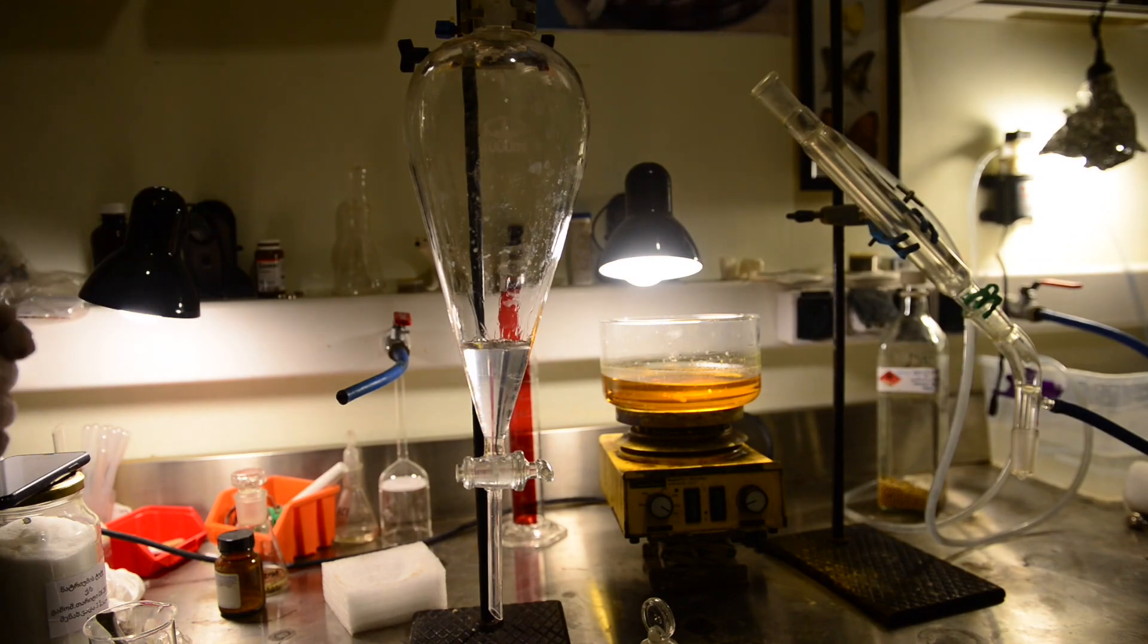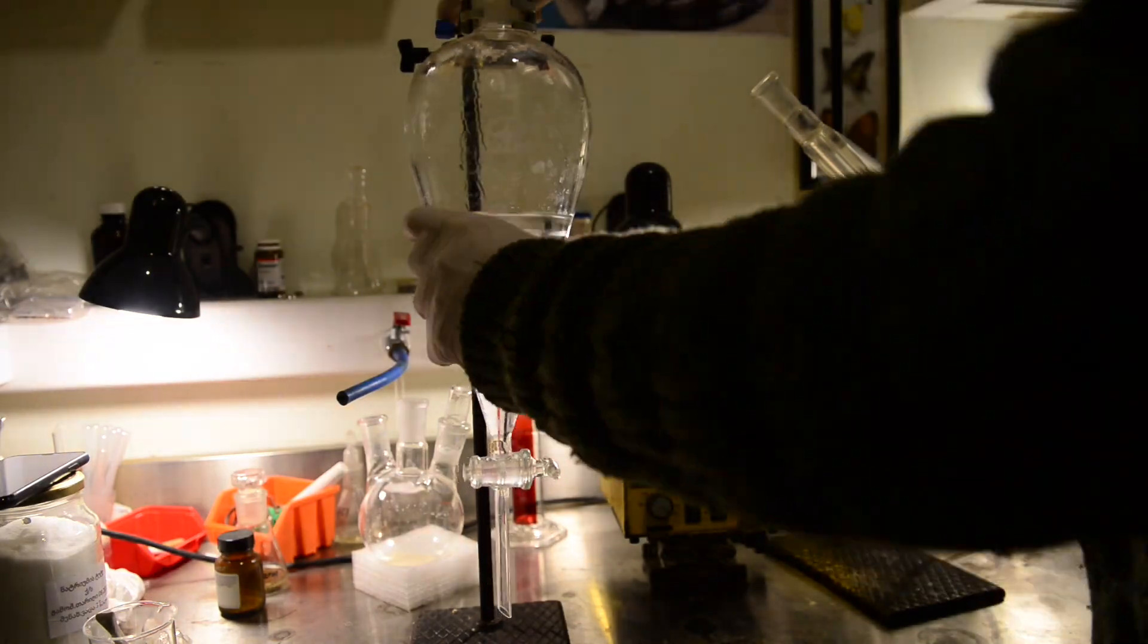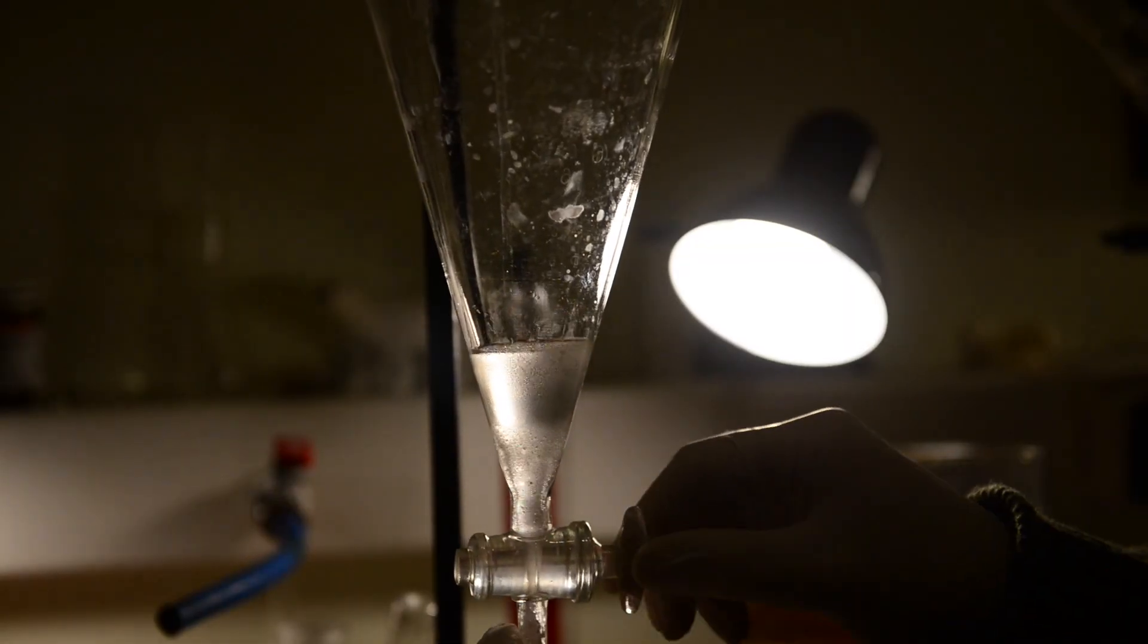We are decanting the liquid to the 1 liter separation funnel. The product is being washed with distilled water. To our surprise there is no emulsion and no problem with separation.